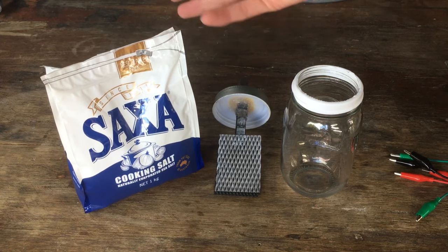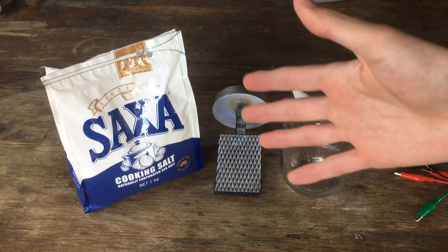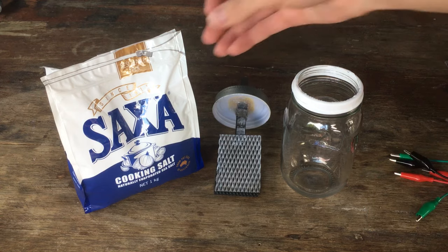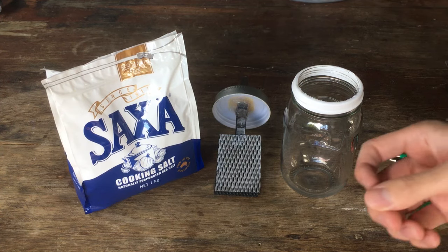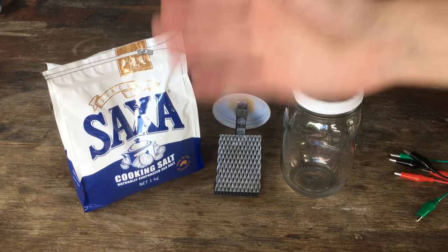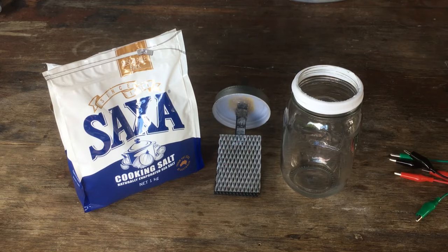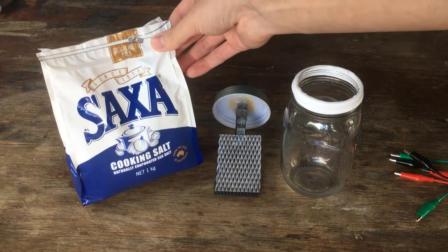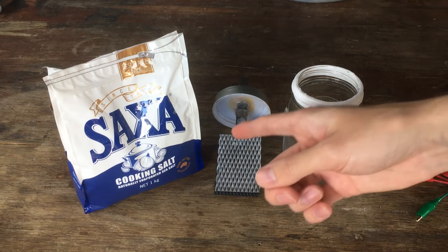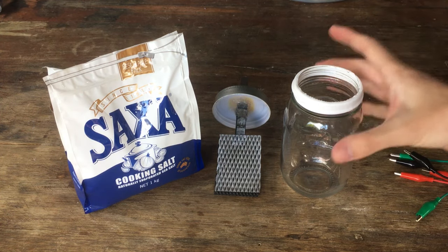Specifically, you don't want just generic table salt, because that's generally got some sodium iodate, I believe, in it, which may interfere with the process. It's good to keep our sodium chloride starting material as pure as possible. So the best thing to go for, generally, is cooking salt, because that's the purest form you can get. I think it's also sometimes called kosher salt. This contains no iodine content and also contains fewer anti-caking agents, which would just be a source of impurity in our process here.